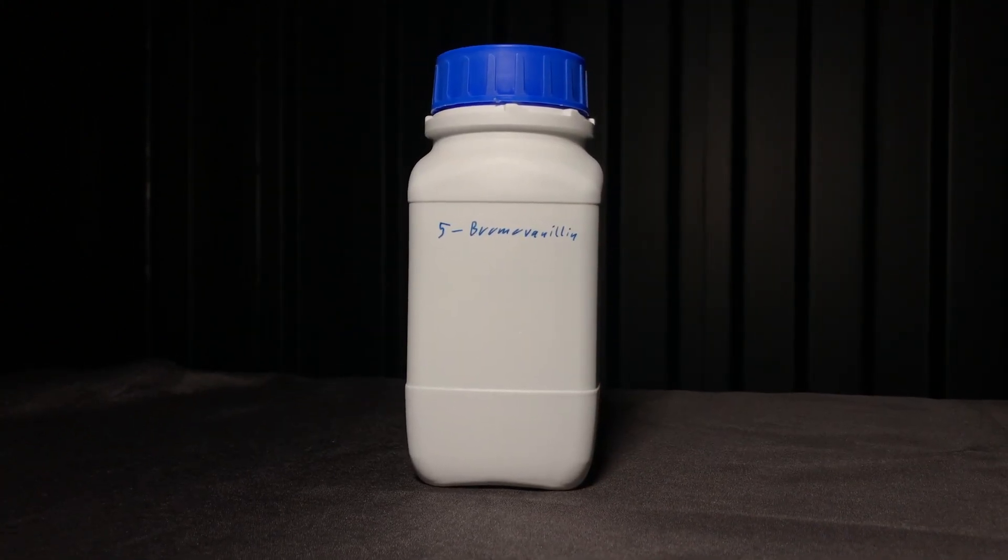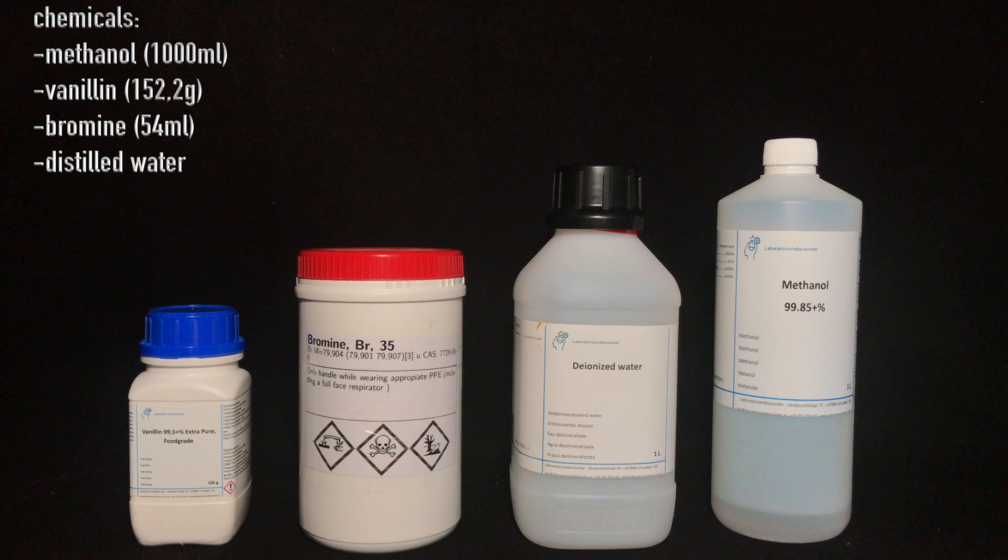It's time to make bromo vanillin. For the synthesis we only need four chemicals: vanillin, bromine, methanol, and distilled water.